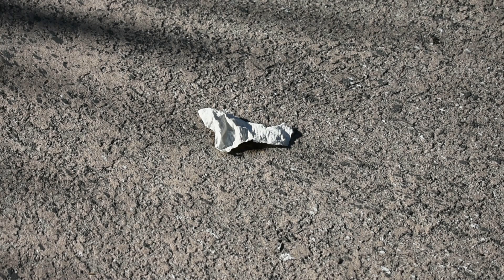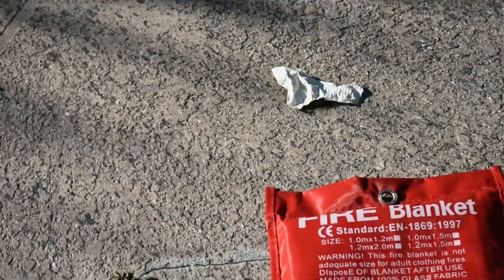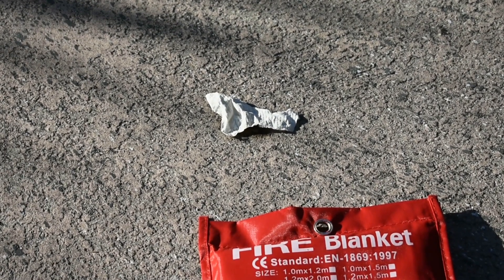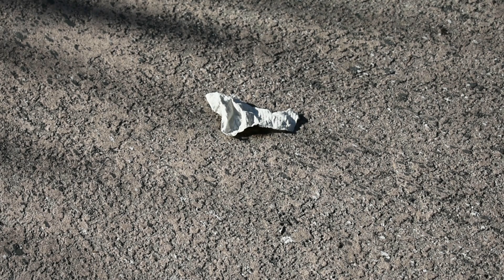Okay, so it's been two days after I made the nitrocellulose. I let it set out to dry. I actually put a fan on it for a little bit to make sure all the moisture was gone. I'm out here on my back porch and we're ready to do some tests. Keep in mind, it's good to have a safety plan. So I've got here my fire blanket just in case anything goes wrong, as well as a fire extinguisher. Let's get started. I'm going to just light off this smaller piece as a test run.